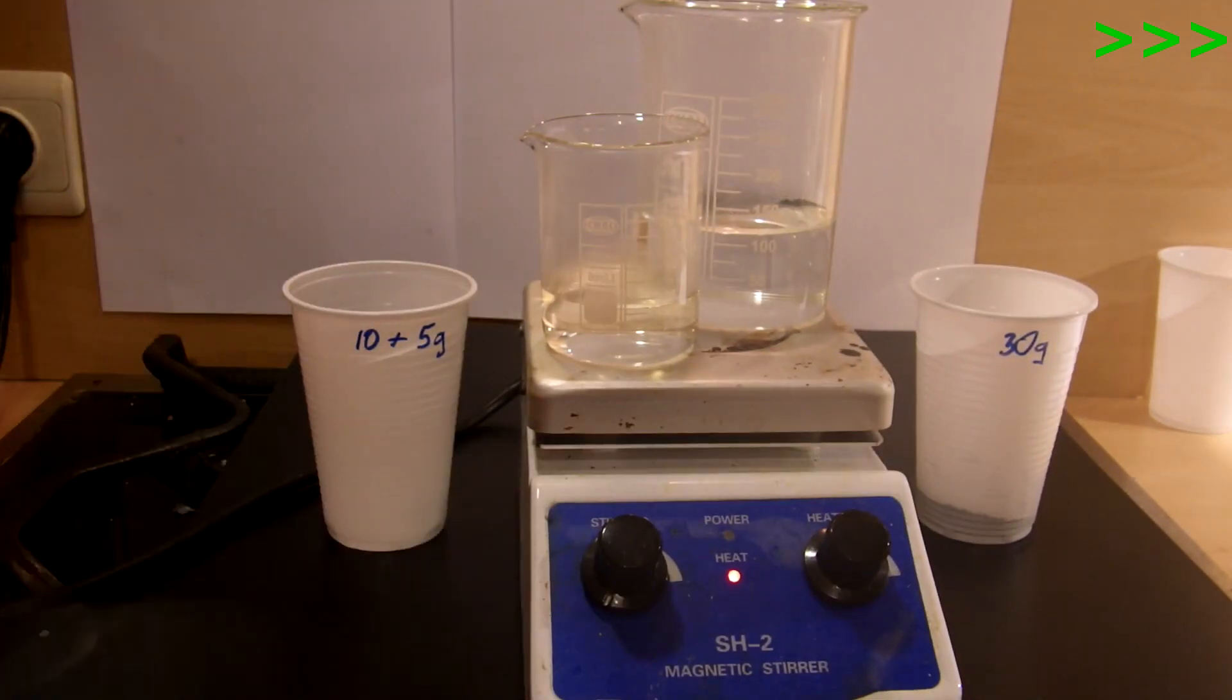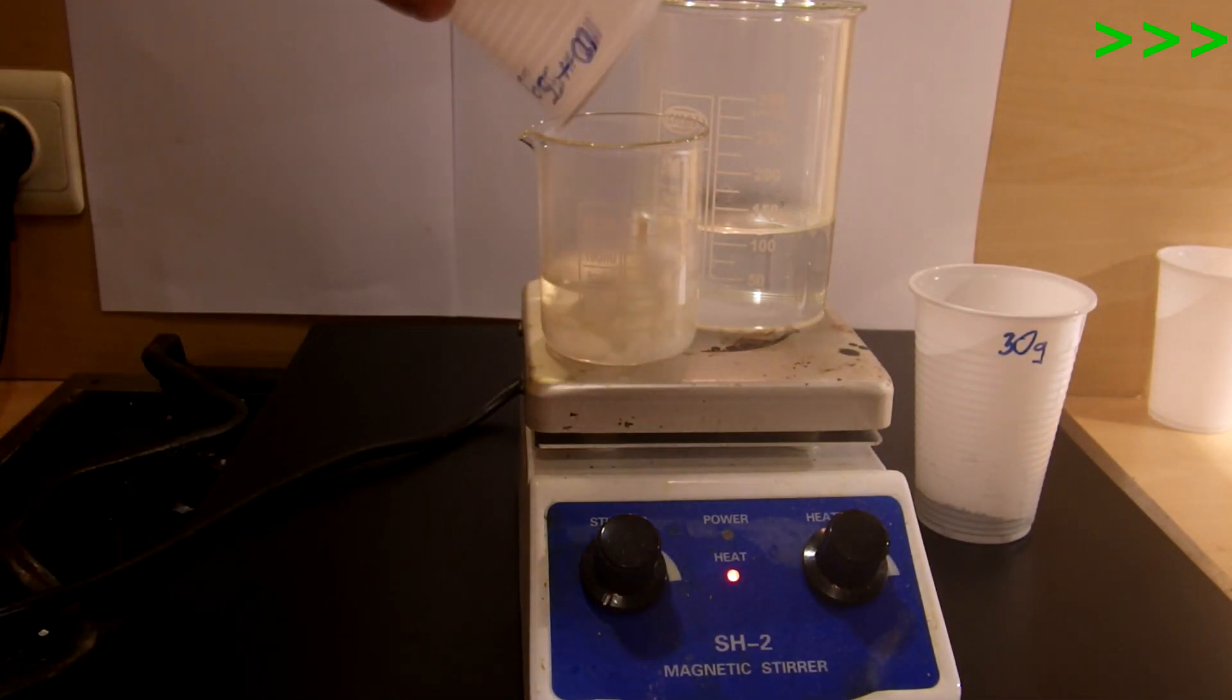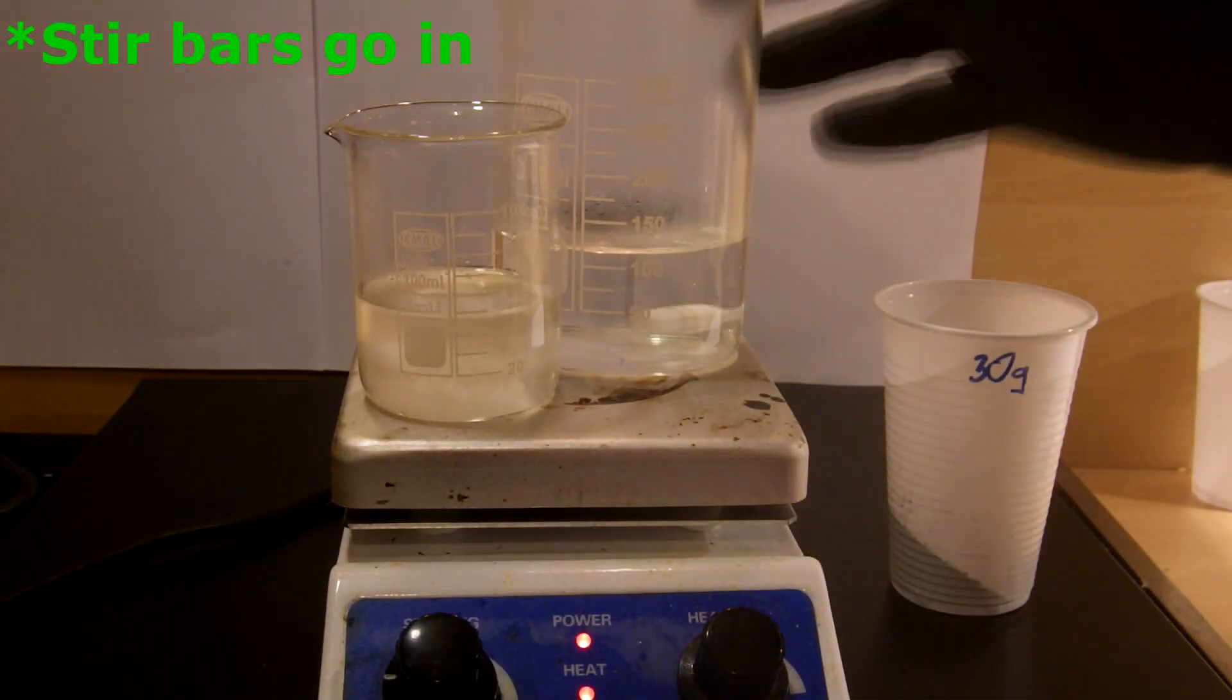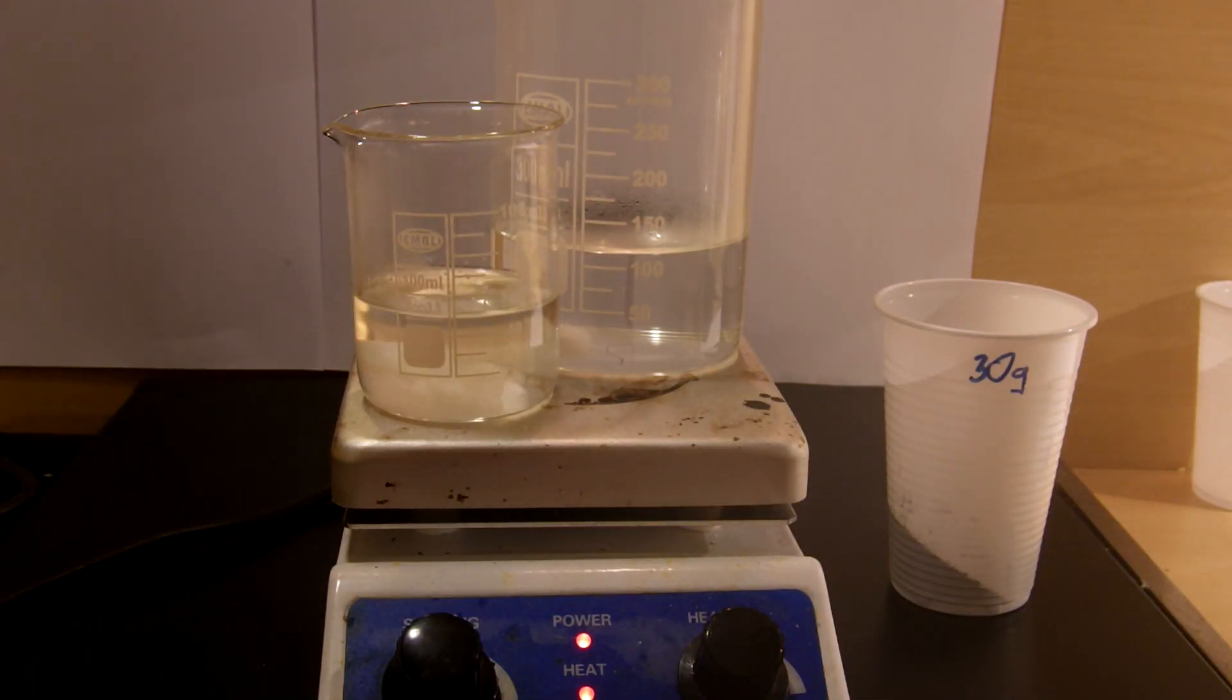I have warmed up my water already, but hot plate with stirring will help to keep things warm while chemicals dissolve. I weigh out water for both chemicals in appropriate sized beakers.